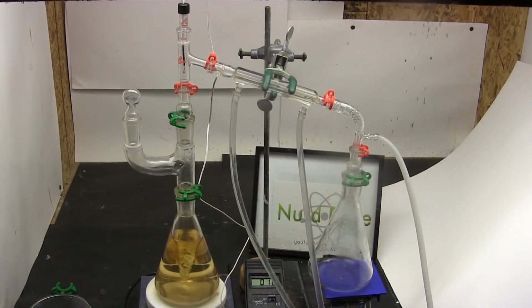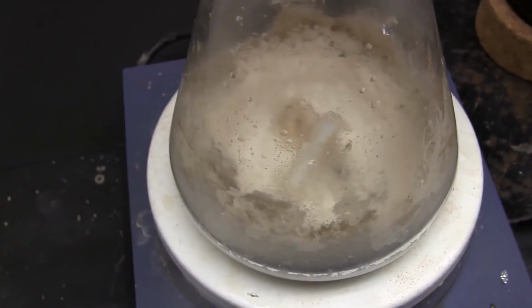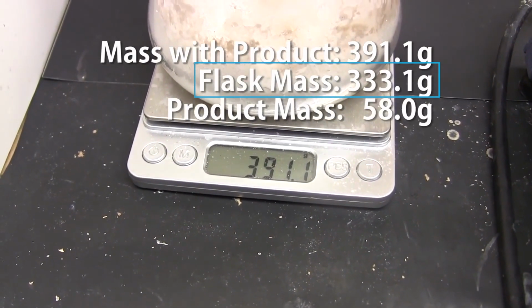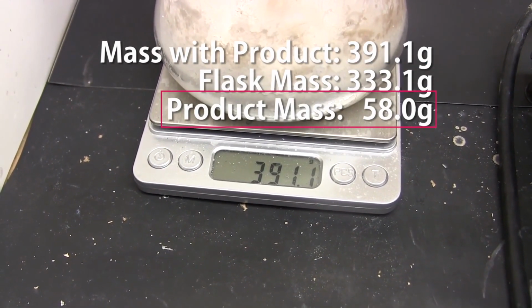Now we remove the water by simply boiling it off. The color of the solution is from lingering organics darkening due to the alkaline conditions and high temperatures. Once all the water is gone, you'll have a mass of sodium propionate. Get its weight so we know how much sulfuric acid to add later. I previously weighed the flask and stir bar to 333.1 grams, so our sodium propionate mass is 58 grams.